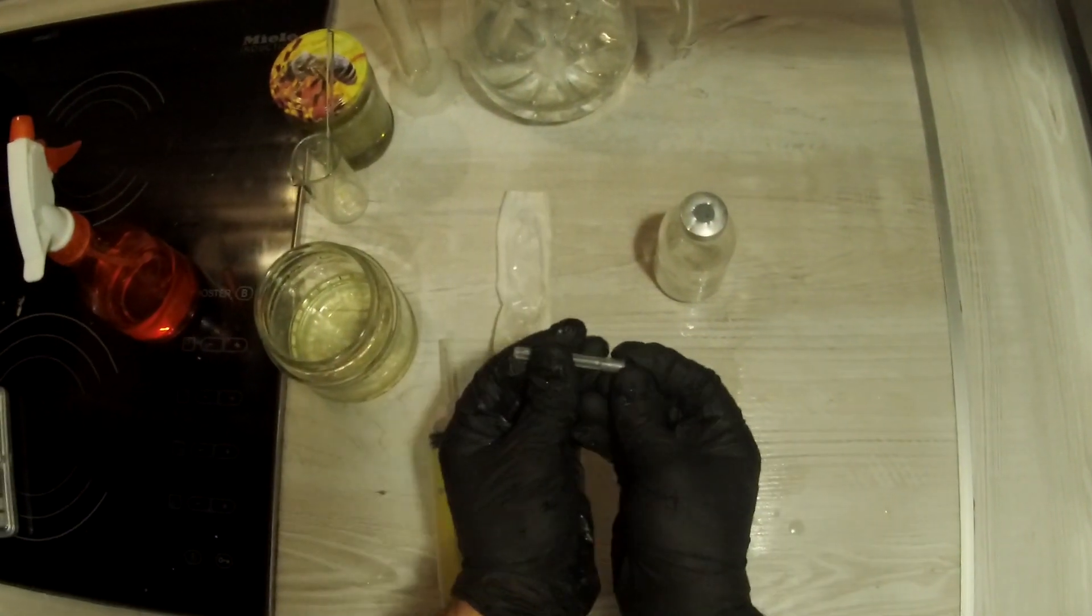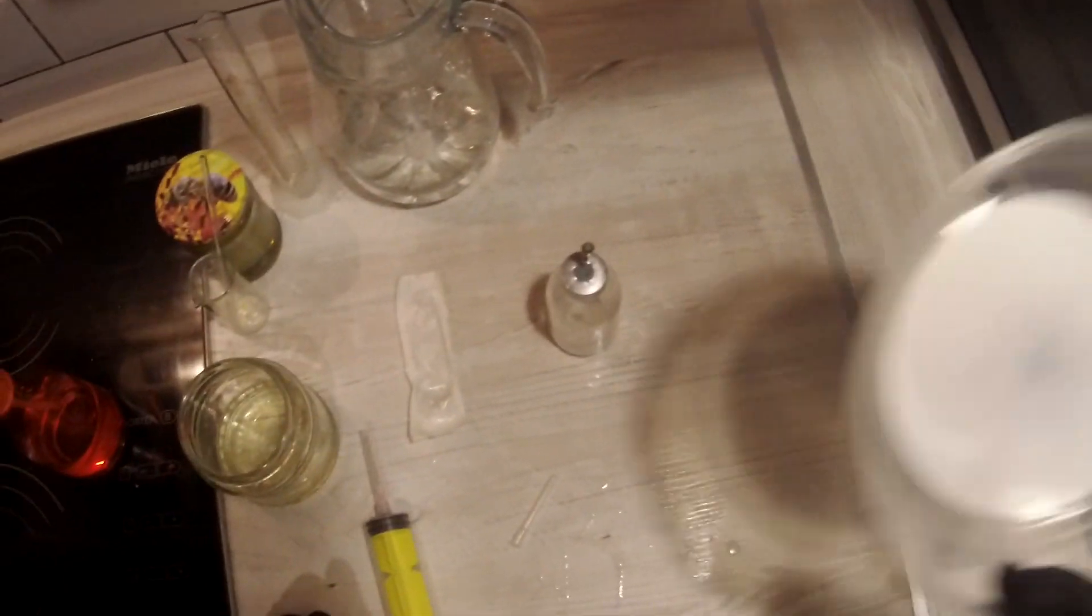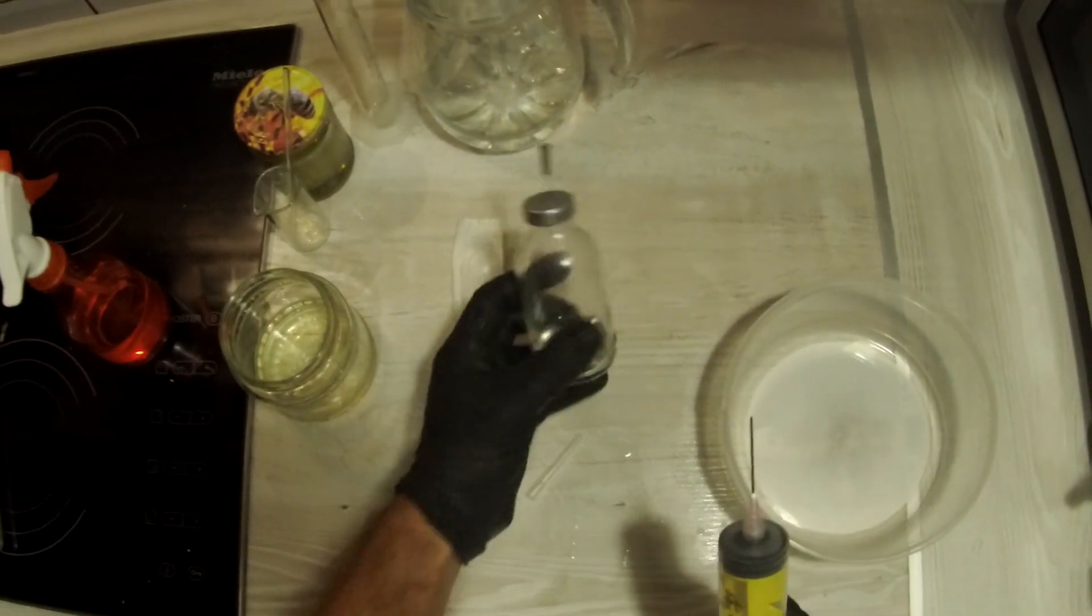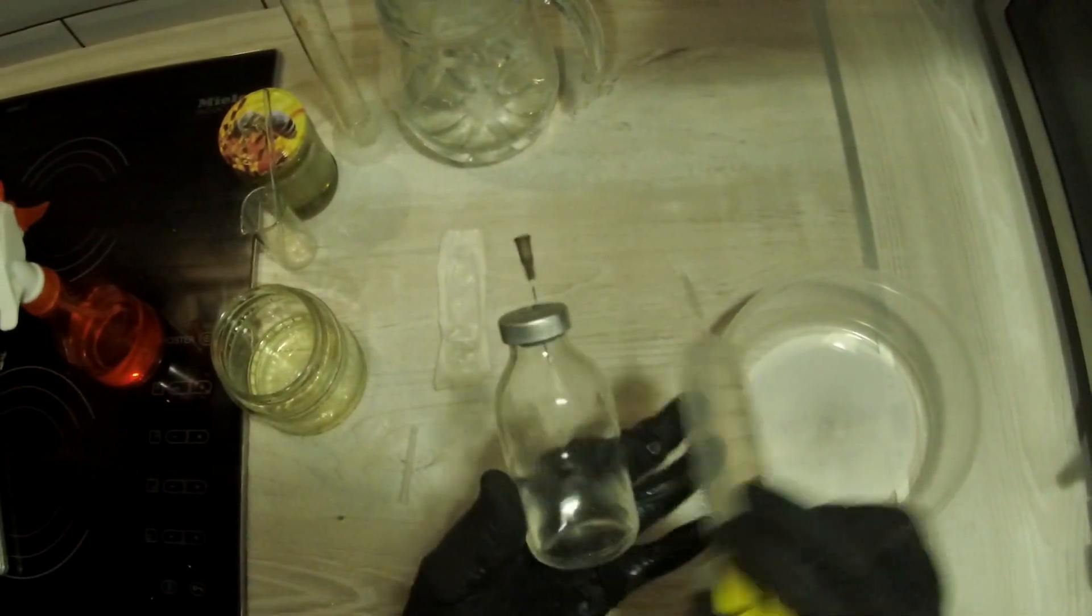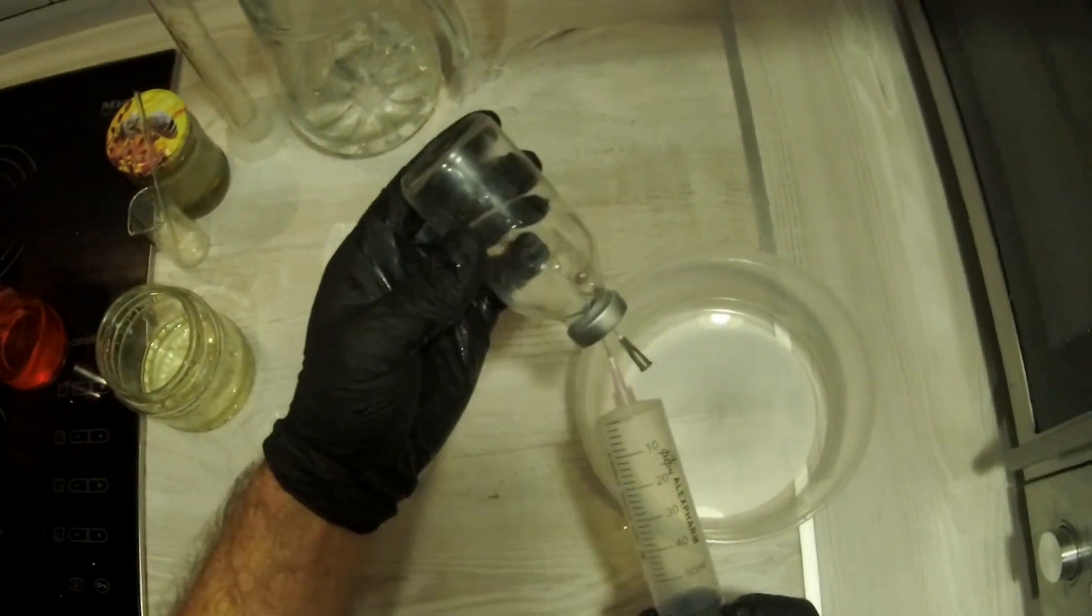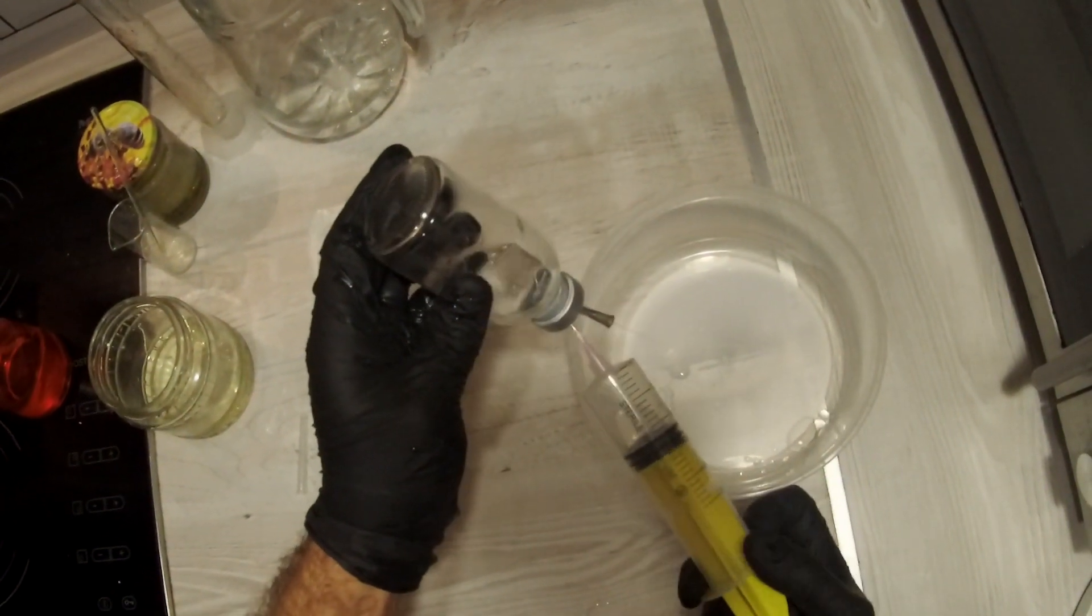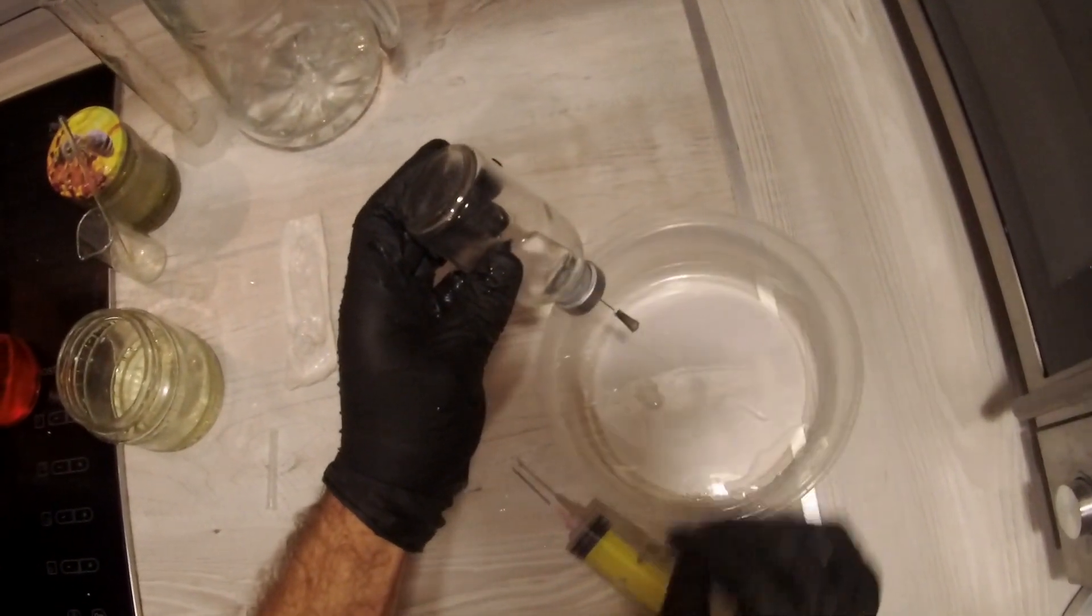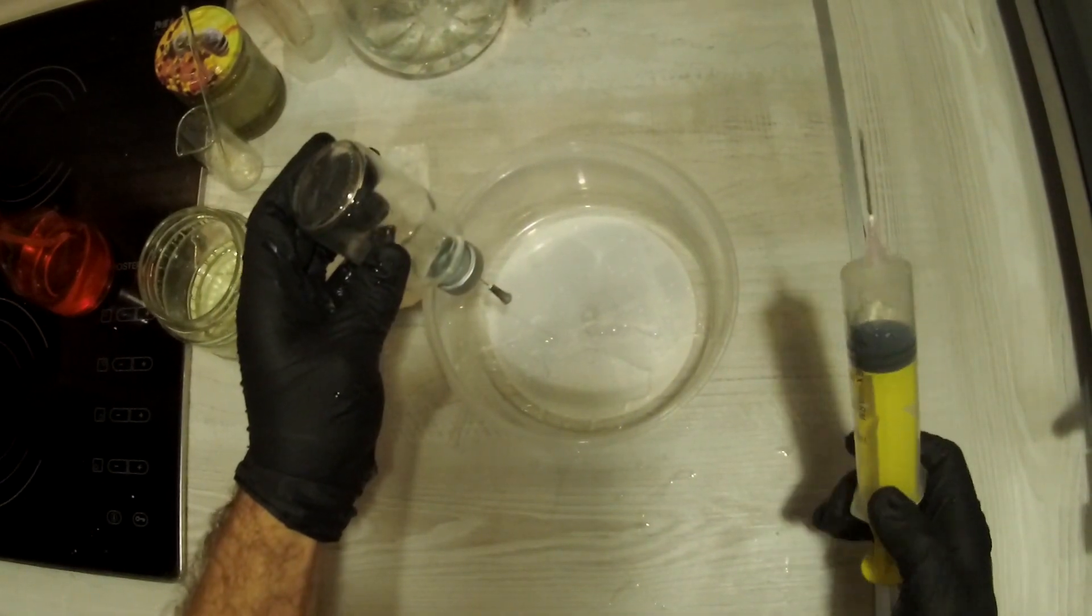The best vials for this purpose are that from medical grade saline solution. And of course, we will need to empty our vials before use. So we will insert a needle into the cap and it will start pumping air inside. Eventually, they will empty themselves and after giving a little rinse, we will inject our honey solution.